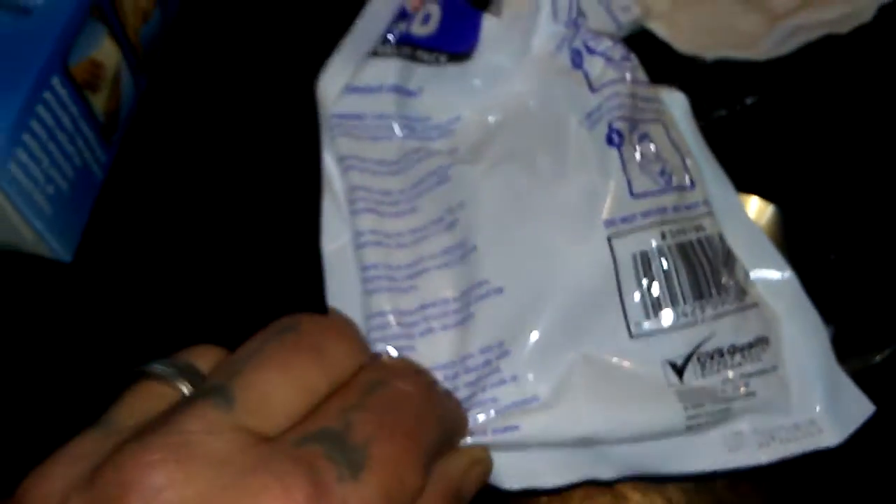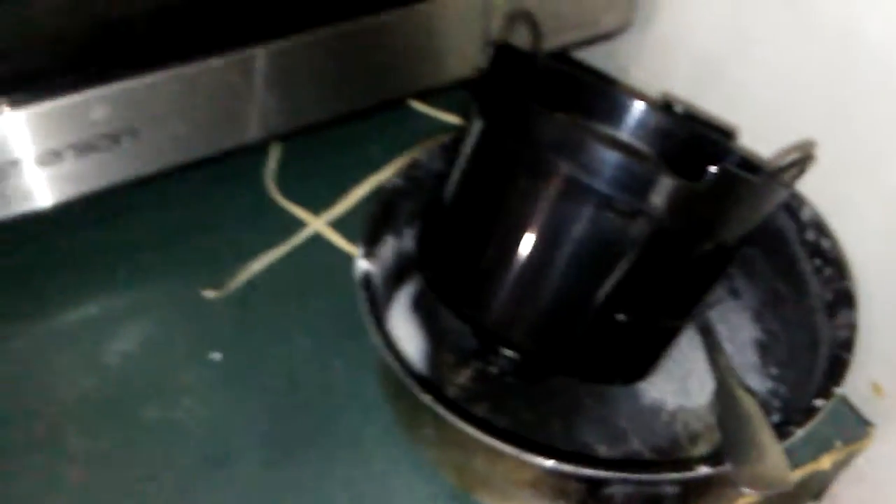Take the water out of the ice pack — you don't have to crush up the balls or anything. Measure out 40 grams into 100 milliliters of water and stir it up until it dissolves. Then heat it on the stove on low and immediately dump in 37 grams of your potassium chloride and stir it all until it dissolves.